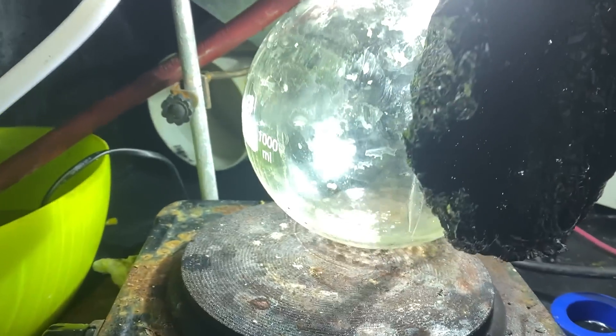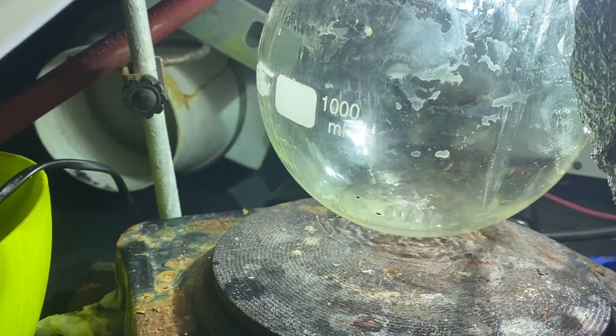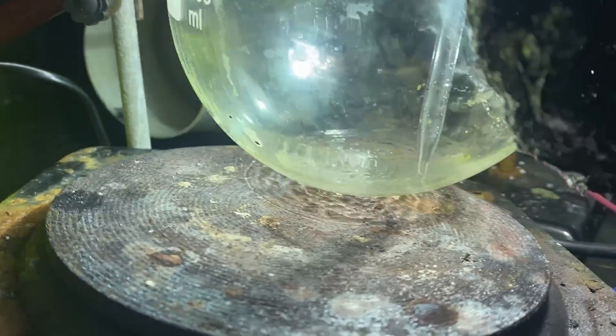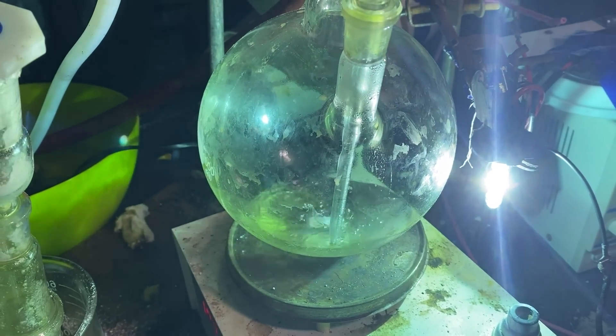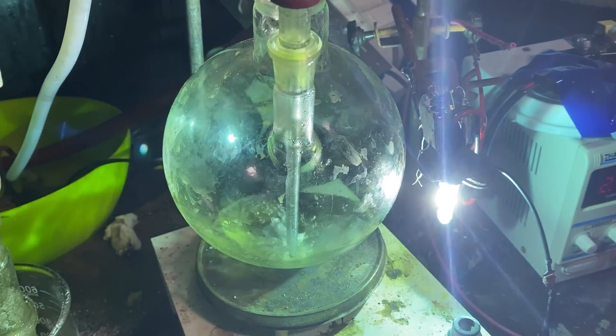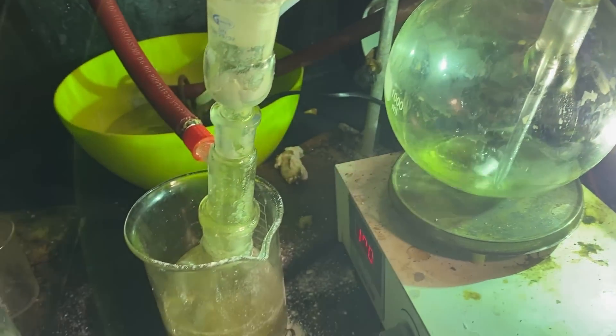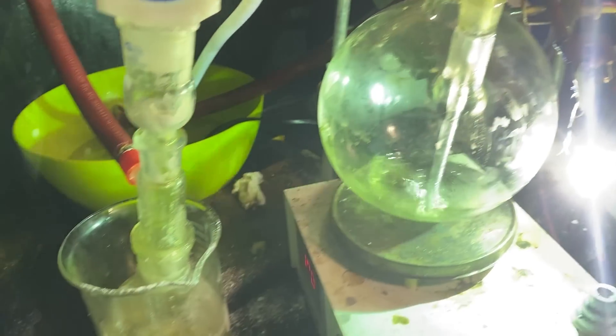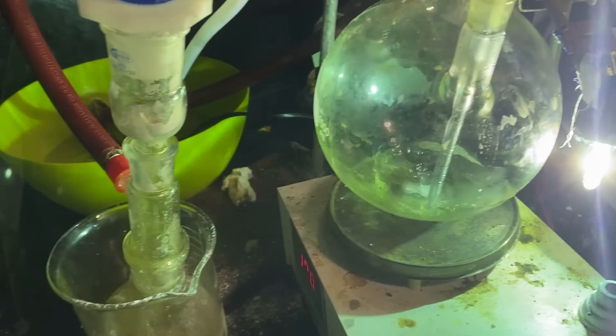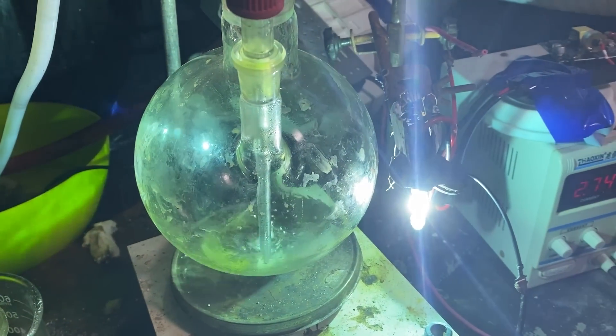Eventually, I've just kind of got fed up with the fact that I couldn't tell if chlorine was flowing into the apparatus, so I've kind of tilted everything to make sure the liquid was enveloped in the output. And as you can see by the bubbles, chlorine was indeed being produced. As the chlorination goes on, the chloroform turns this greenish color, which after turning on the UV lamp, goes away. This is a telltale sign of chlorine being dissolved into the chloroform and then being reacted away.